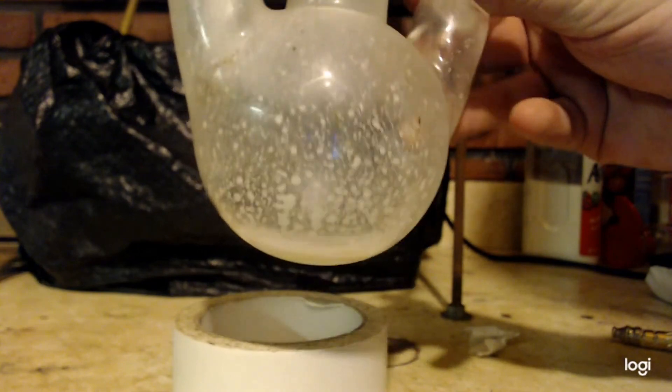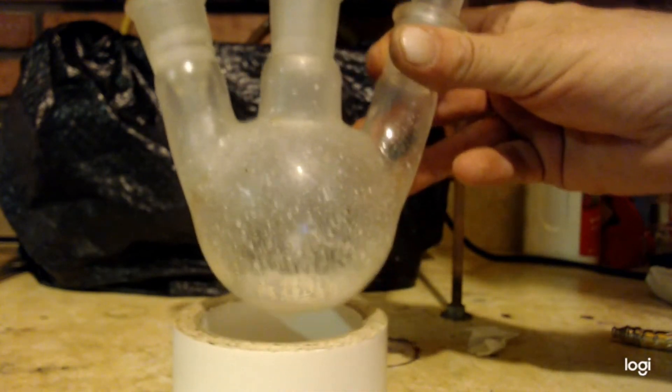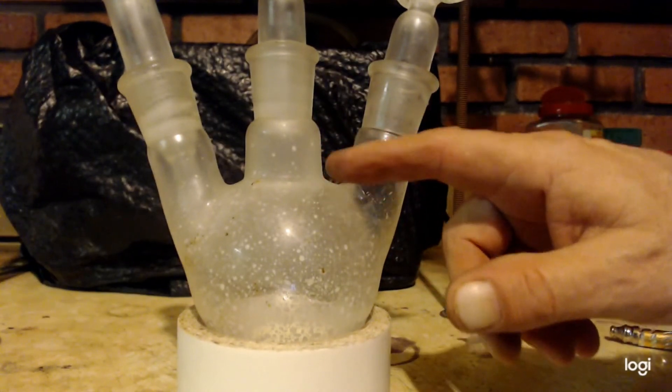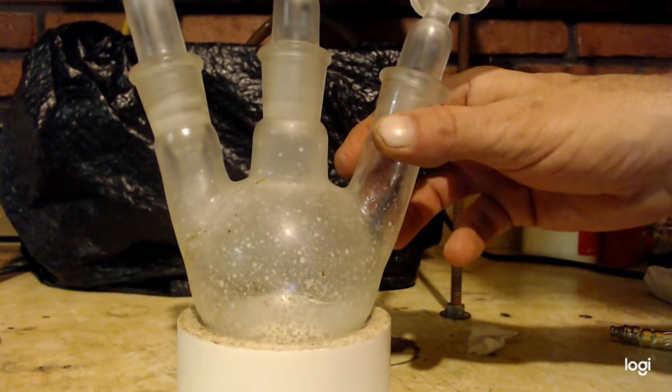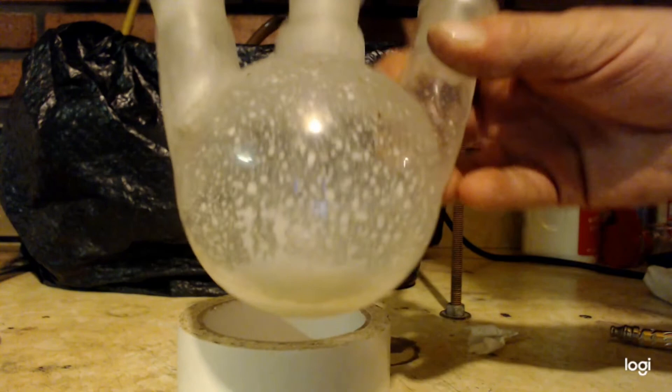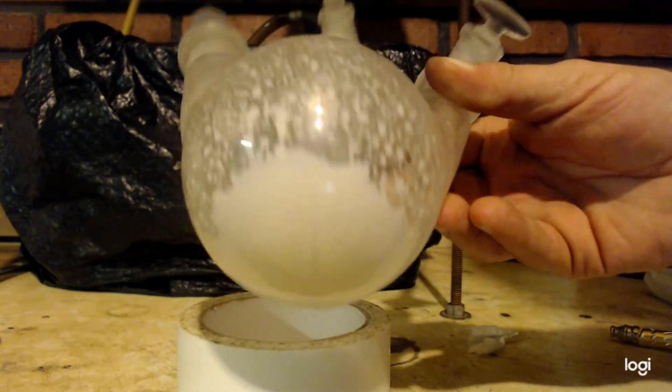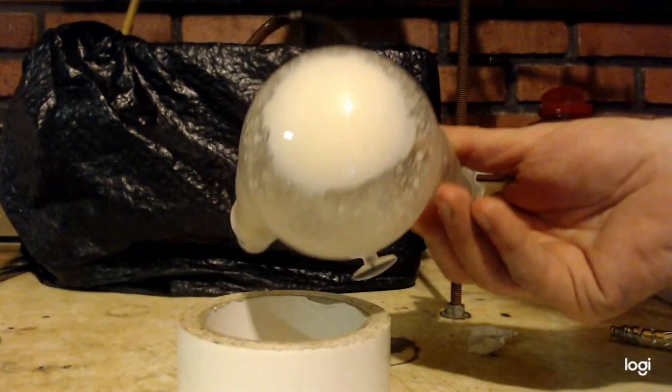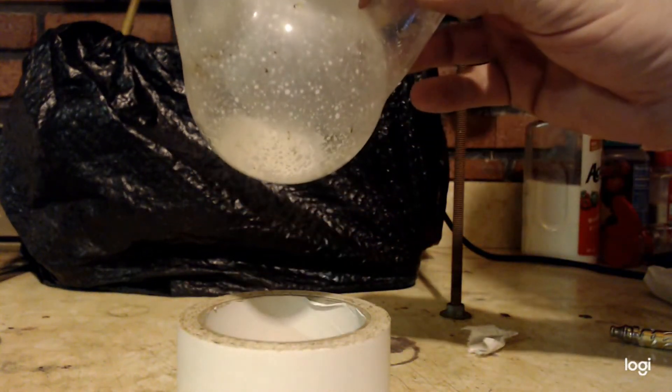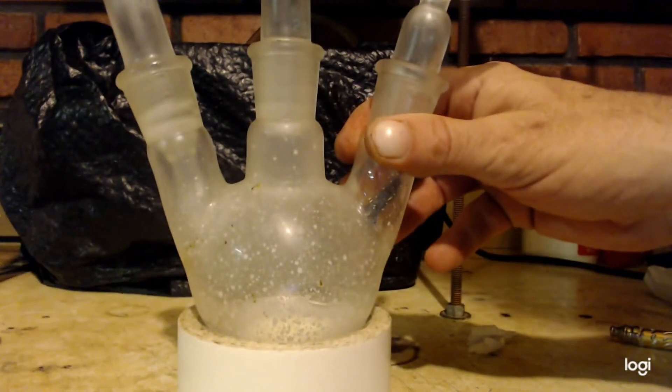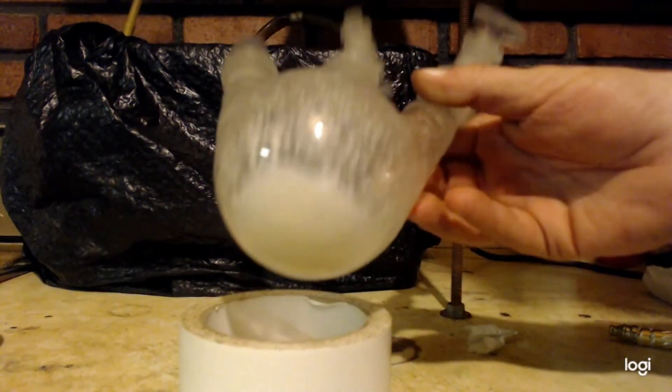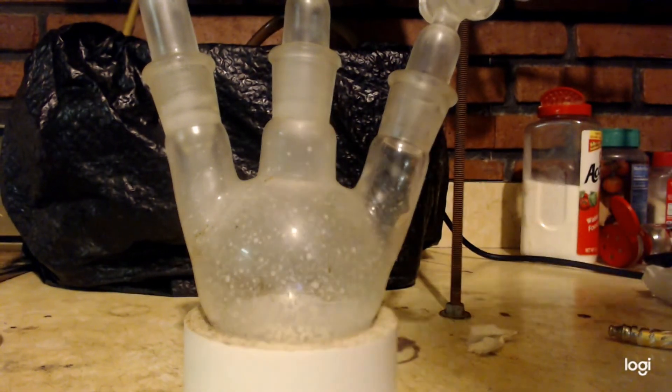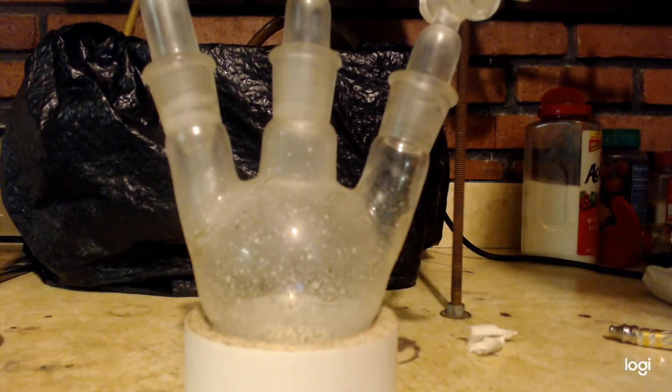So next time if it's even less than this, that's almost non-existing. Remember we cleaned the chloroform, we cleaned our ammonium chloride with chloroform and distilled the chloroform off of that, and there was like nothing in that. So this is like all the dimethylamine we made. It's not very much to do anything with. Maybe I could use it as a catalyst in something. Anyway, always have a great day and always remember science is great.